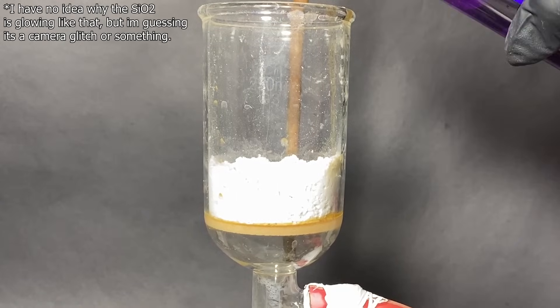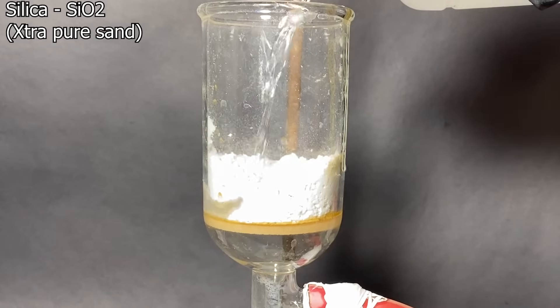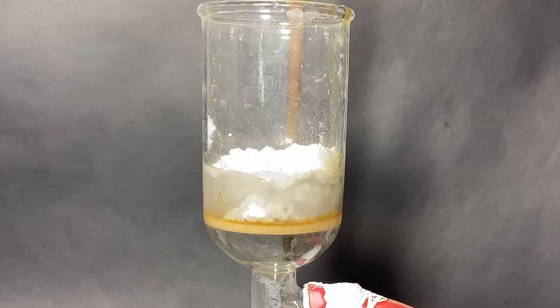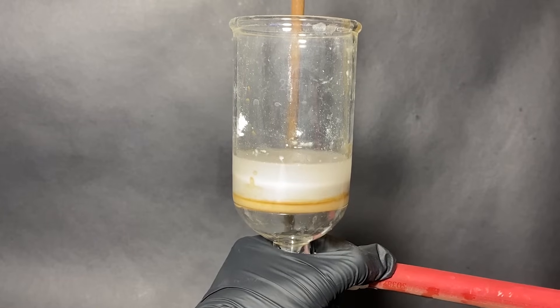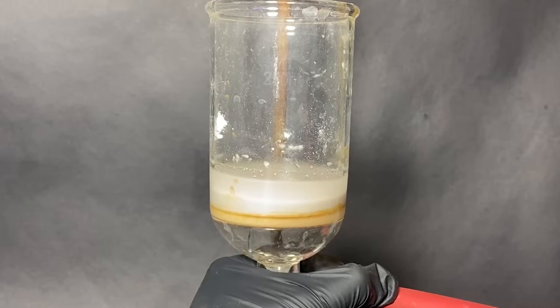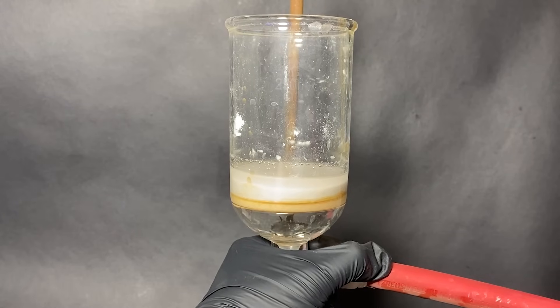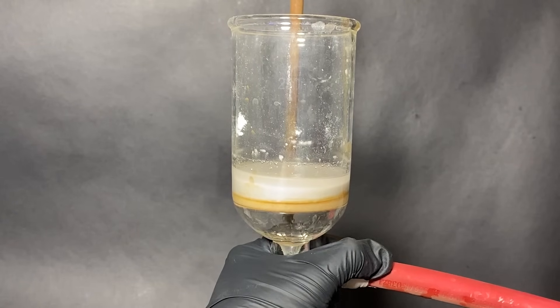So to start, I've pulled out a Buchner funnel which we'll use as a chromatography column. This Buchner funnel was then stuffed with some extremely fine silica, and then I poured in some absolute ethanol. Once the silica settled, I had to pull a vacuum, but because my vacuum pump broke, I had to suck the air out using my lungs. Yes, that's as stupid as it sounds. In general you shouldn't use your lungs for vacuum filtration, but since it's just alcohol, I figured I could do it without harming myself.